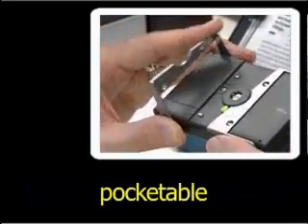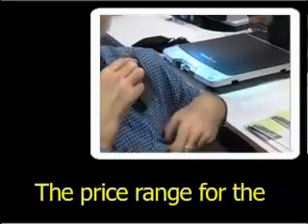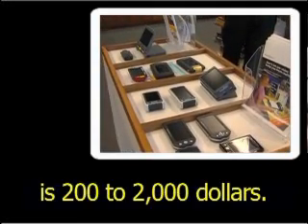These units are truly pocketable while providing a very useful tool for spot-reading tasks. The price range for the electronic pocket models is $200 to $2,000.